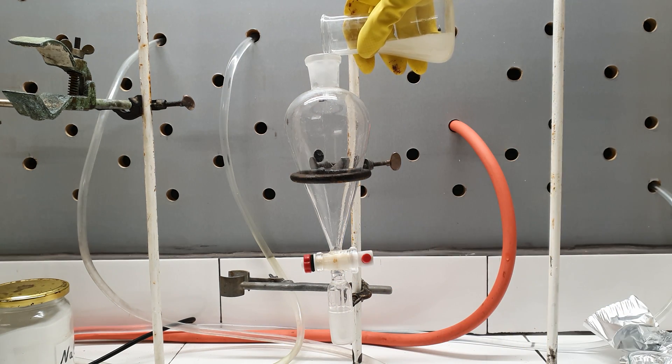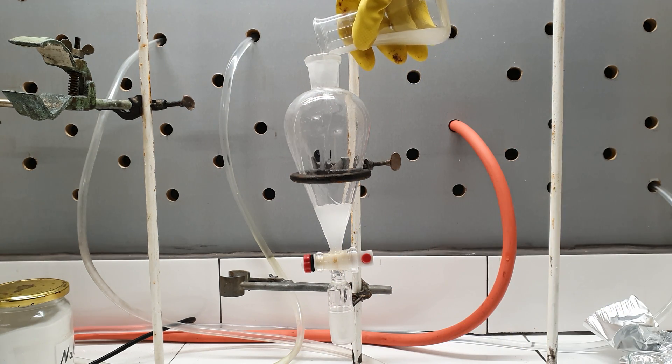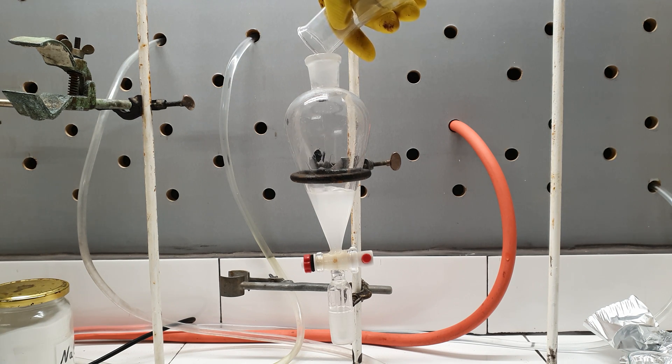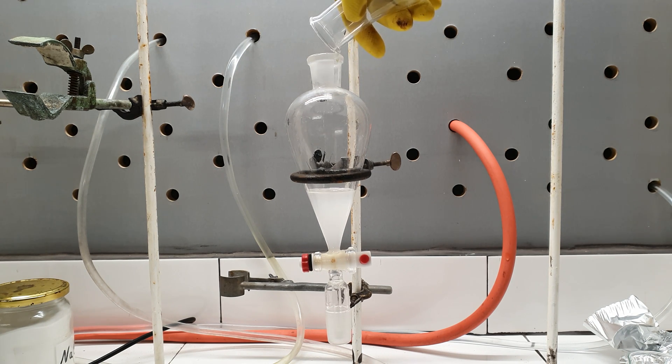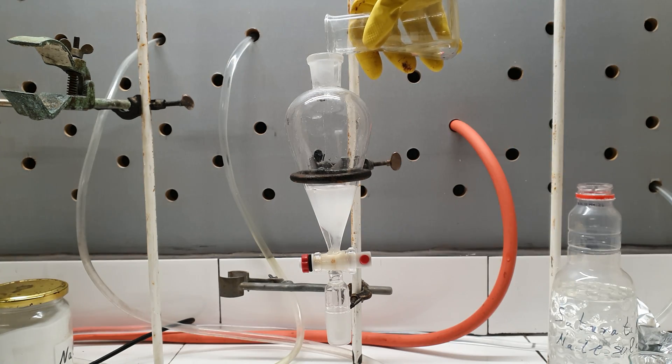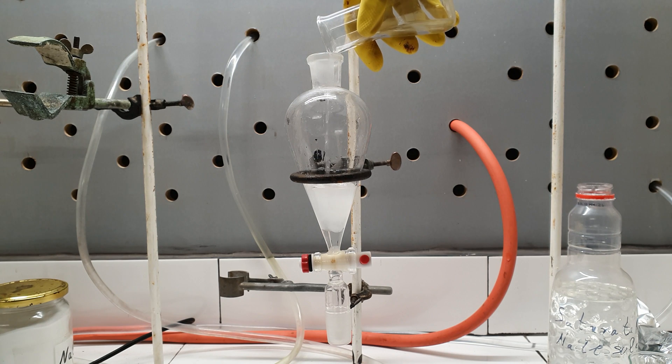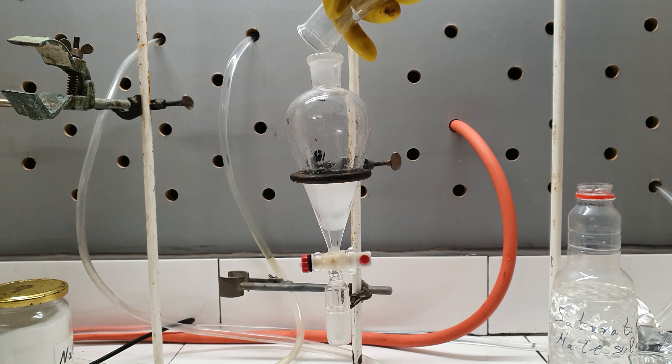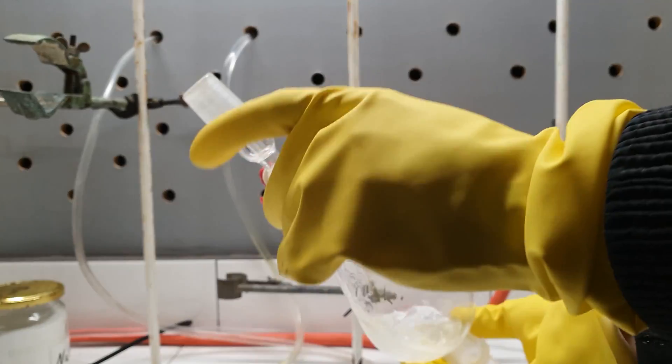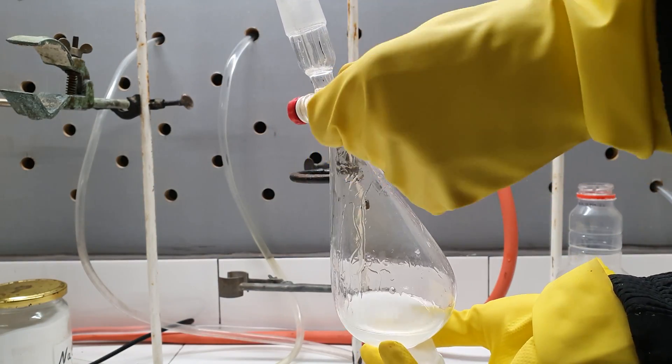The combined amounts of nitromethane were again charged into the funnel. To dry them, I added about 30 ml of saturated sodium chloride solution. The funnel was capped, shaken and vented several times.